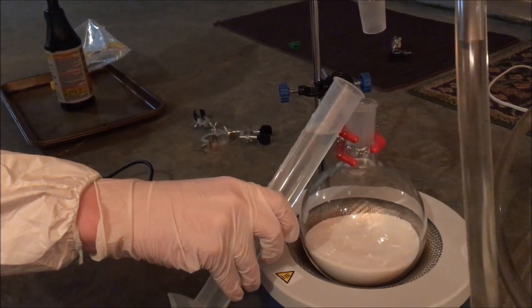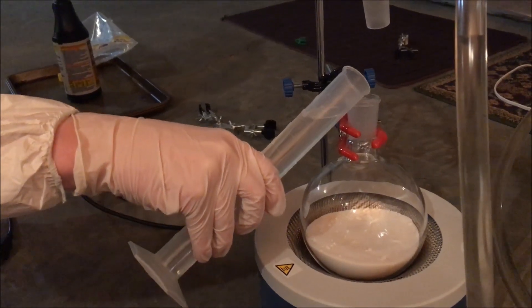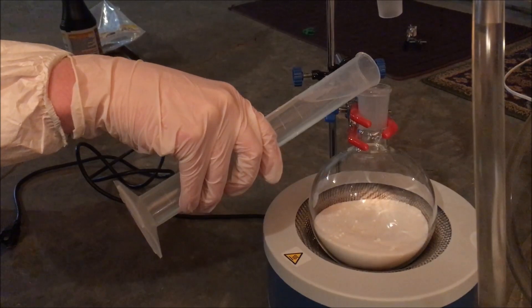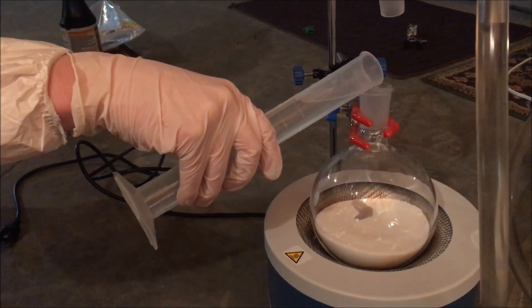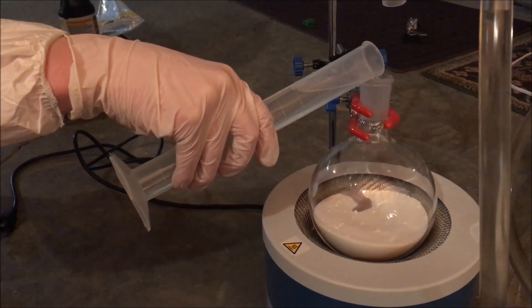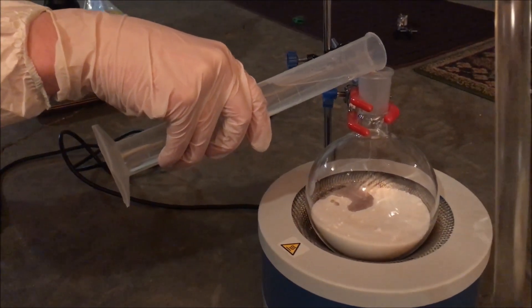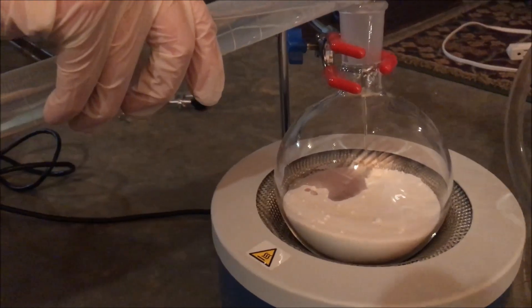I then added this sulfuric acid into the same flask with the potassium nitrate. When mixing the two, it might make a little bit of heat and a little bit of nitrogen oxides. So be careful.